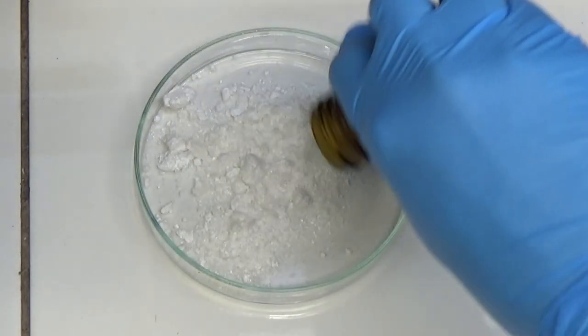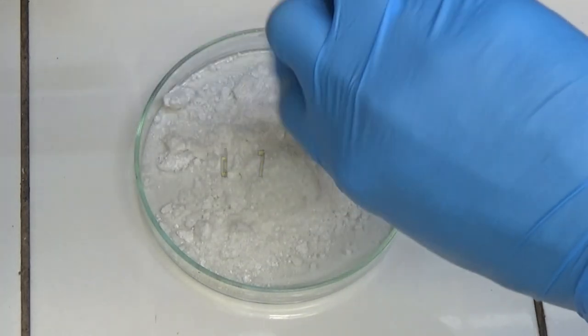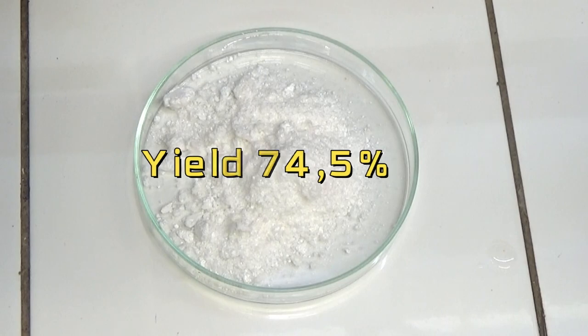In this synthesis, 20 grams of phenylacetic acid were obtained for a yield of 74.5%.